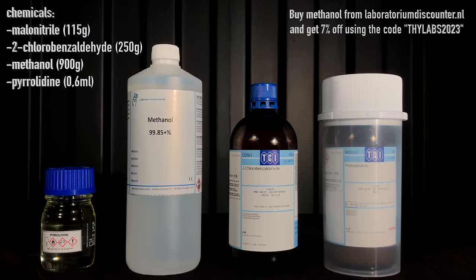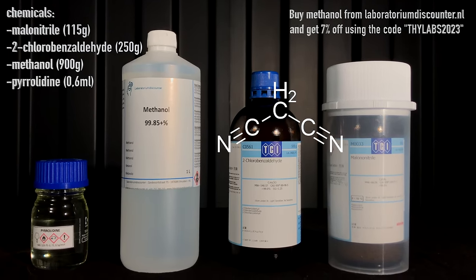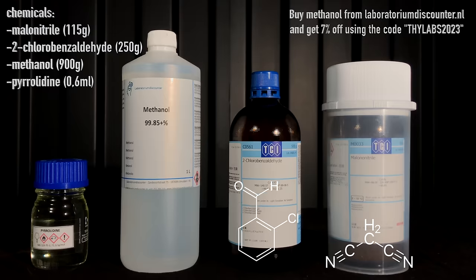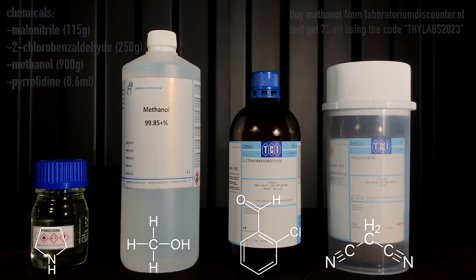Why am I even doing this? For the actual synthesis, four chemicals are needed: malononitrile, 2-chlorobenzaldehyde, methanol and our favorite disgusting amine.